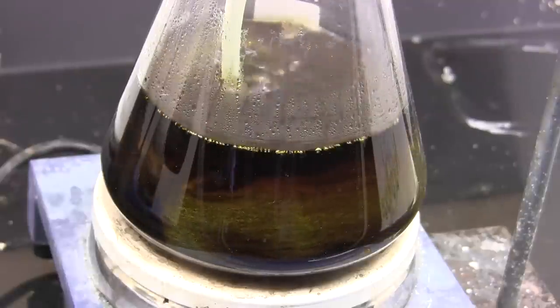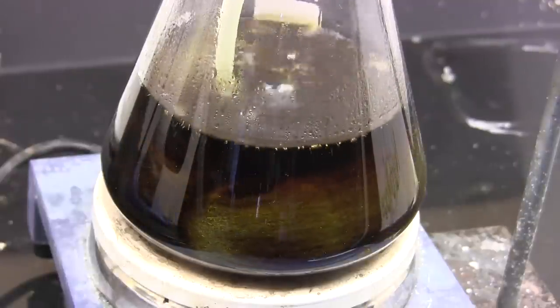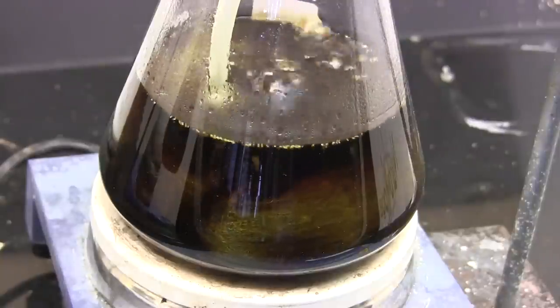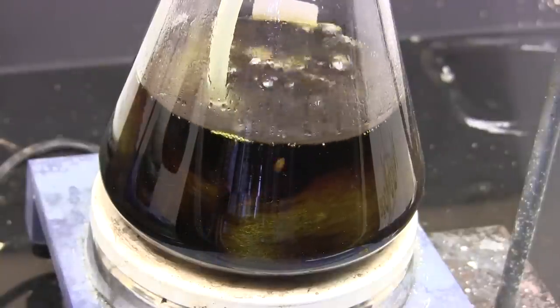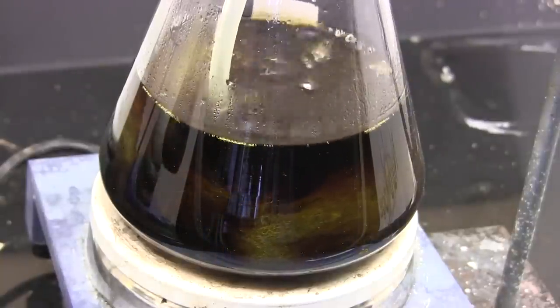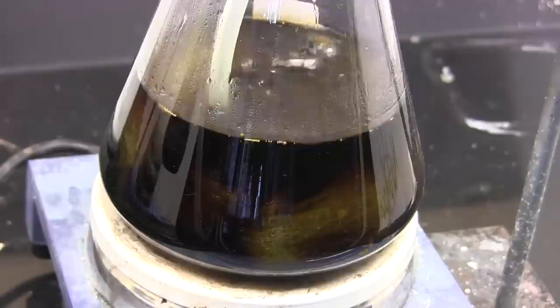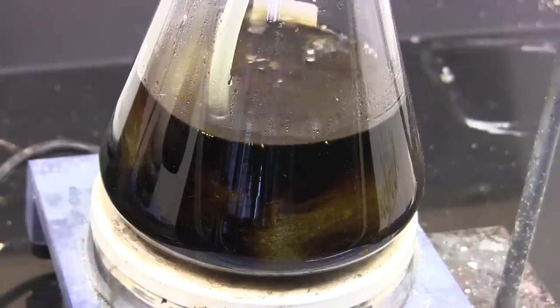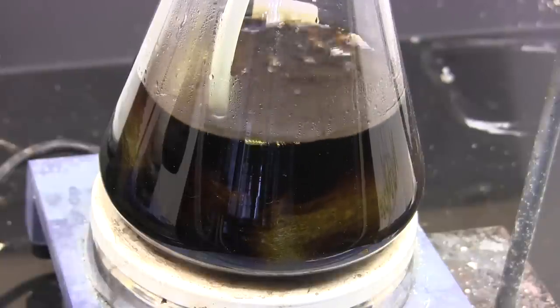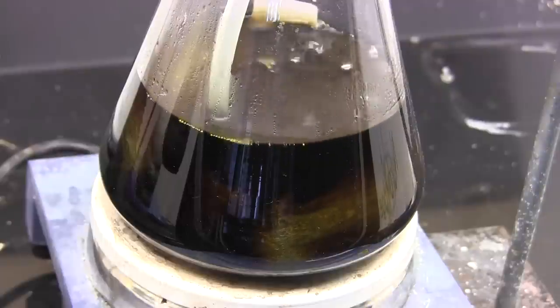Now you'll notice a lot of the steel wool remains. Ferric chloride is an extremely active catalyst for this reaction so only a tiny amount is needed. It works so fast to react the chlorine with the toluene that no chlorine is left over to dissolve more steel wool. Looking back I probably could have gotten away with just using a couple of grams of steel wool but no well.